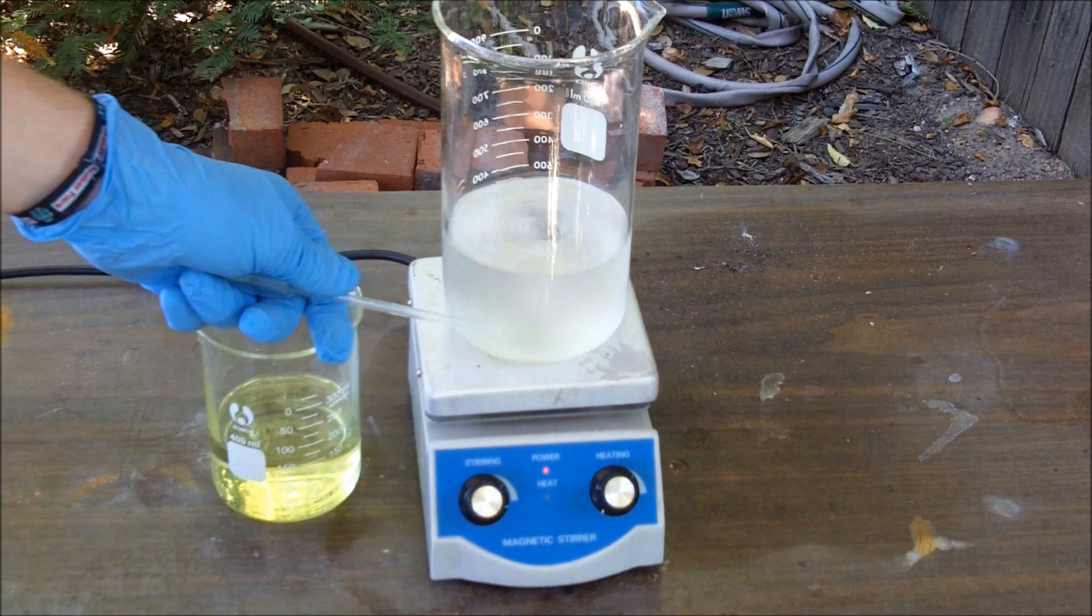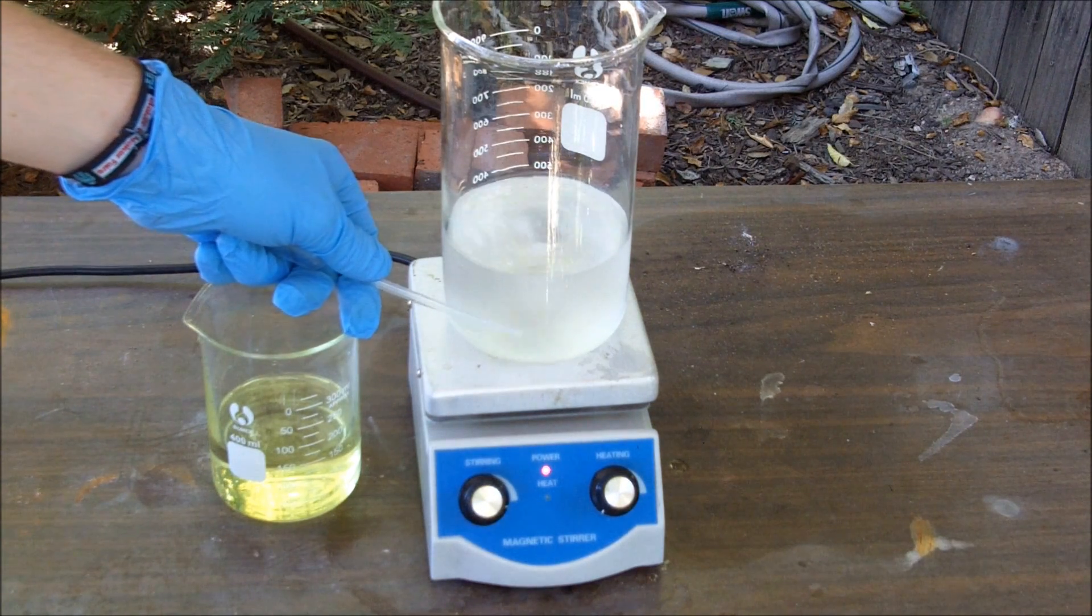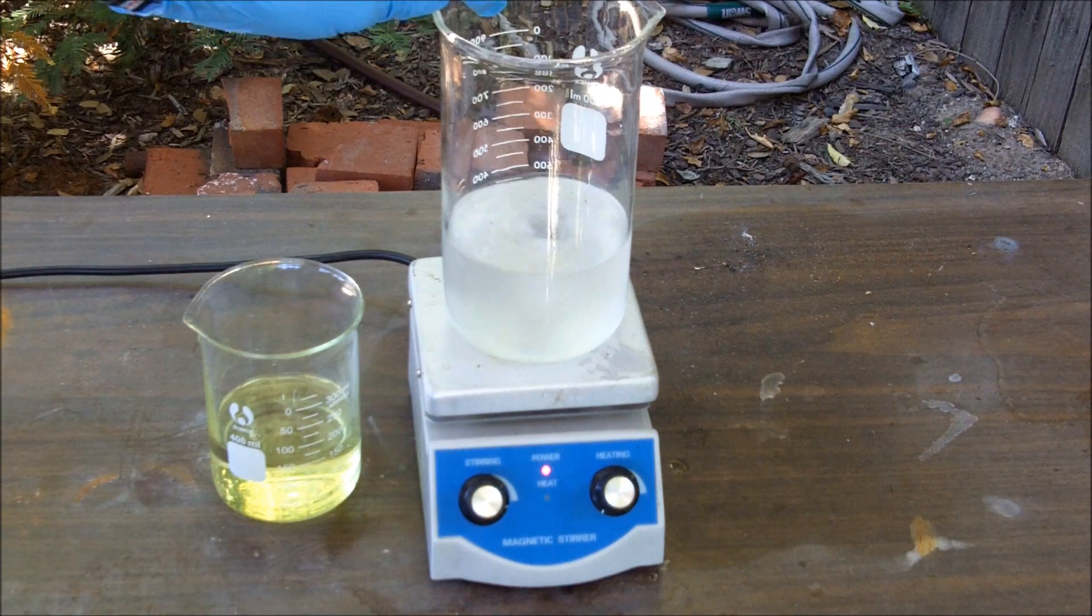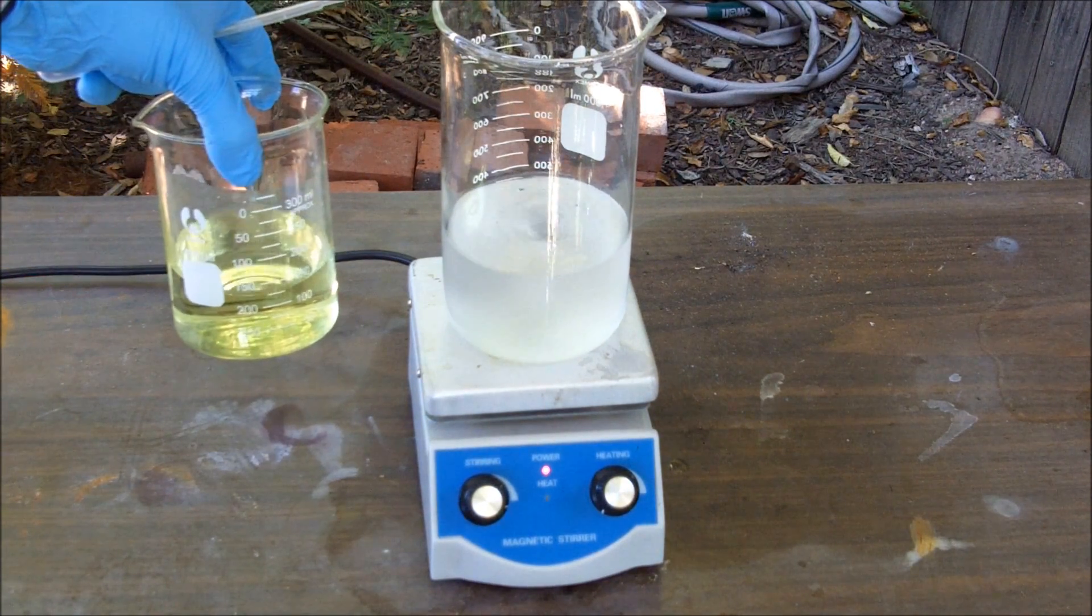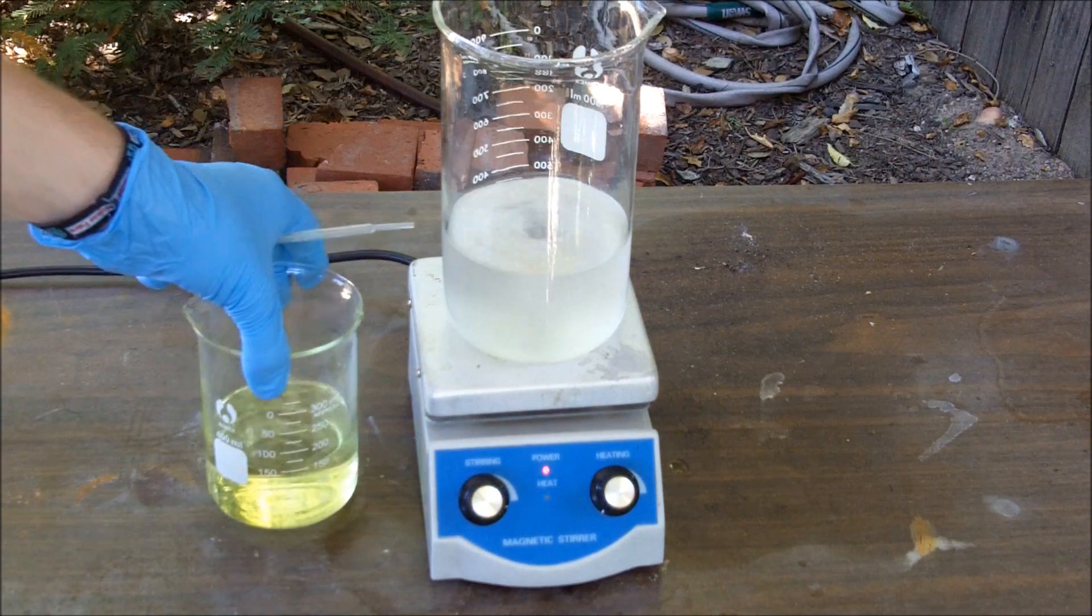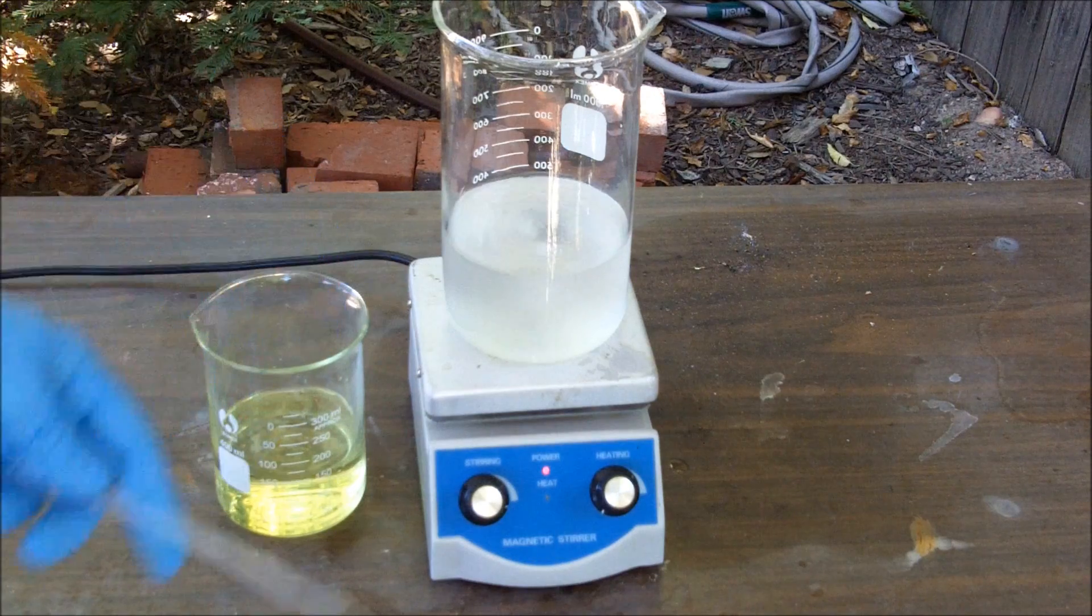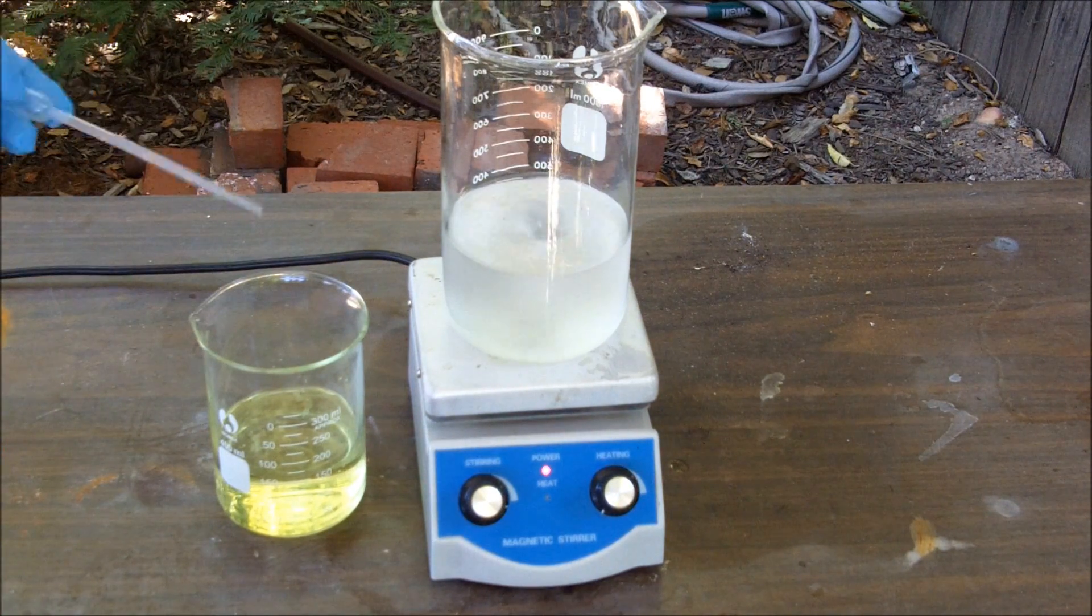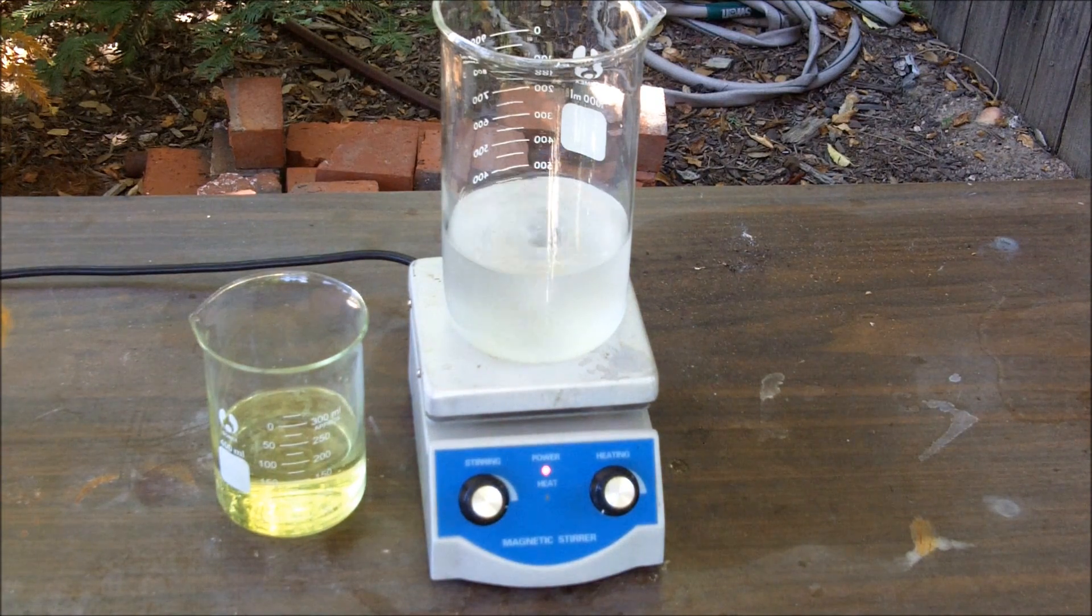So stirring right now I have 250 milliliters of concentrated ammonia and 100 milliliters of methyl ethyl ketone in a 1 liter tall form beaker. And here I have 0.25 moles or 186 grams of 10% sodium hypochlorite. This has been stirring for a while now, and I am going to be slowly adding the hypochlorite to the MEK and ammonia mix over a period of about 10 minutes.